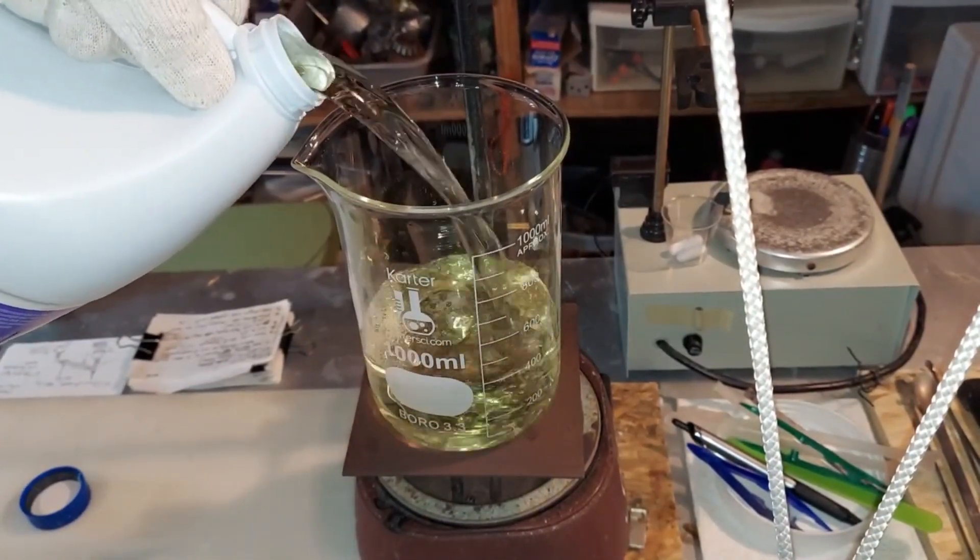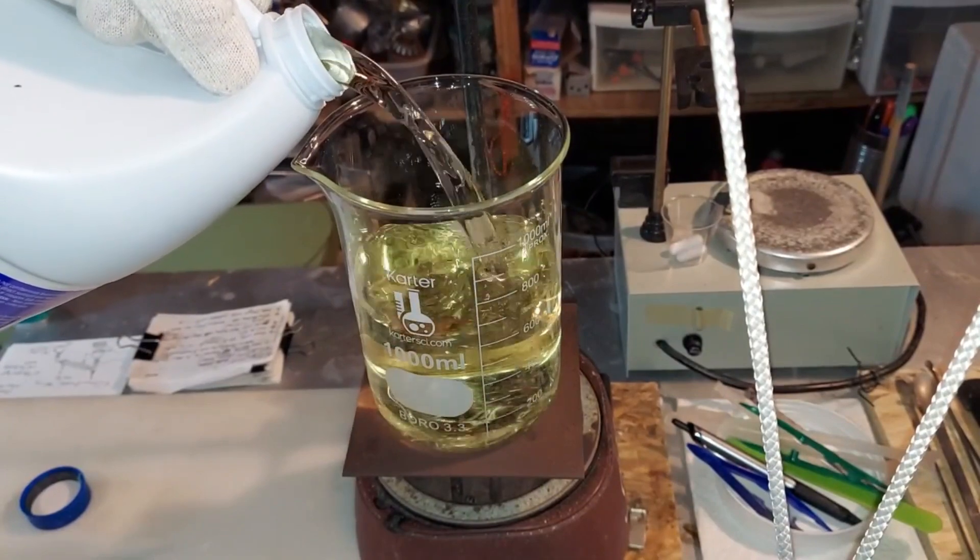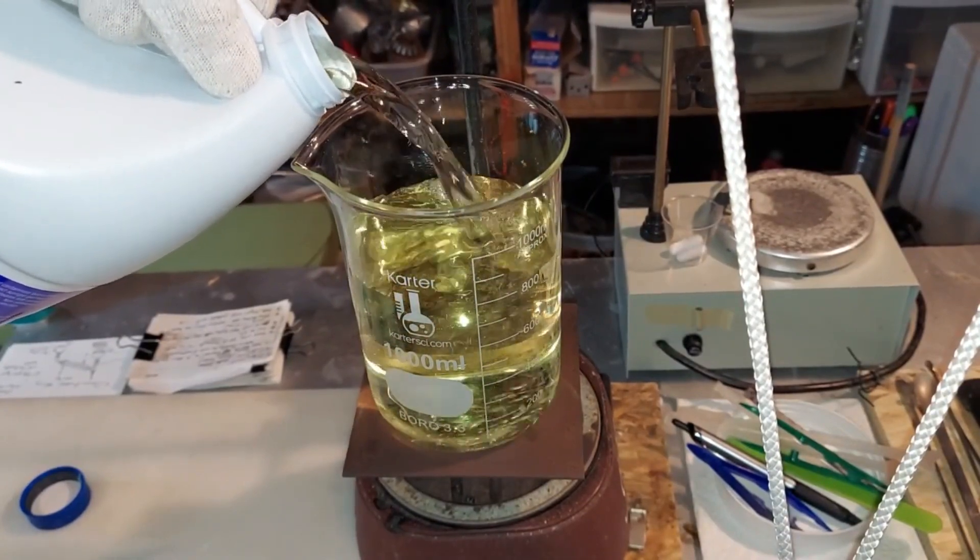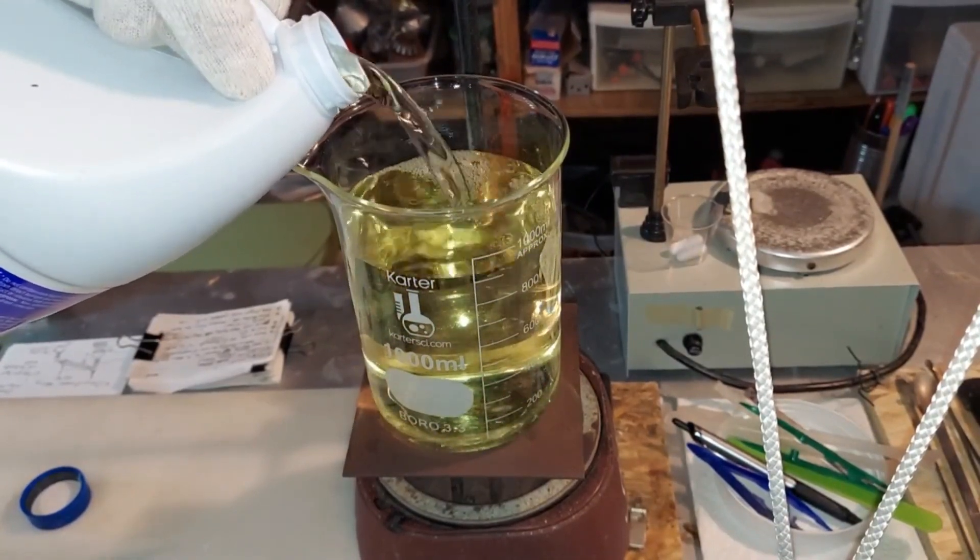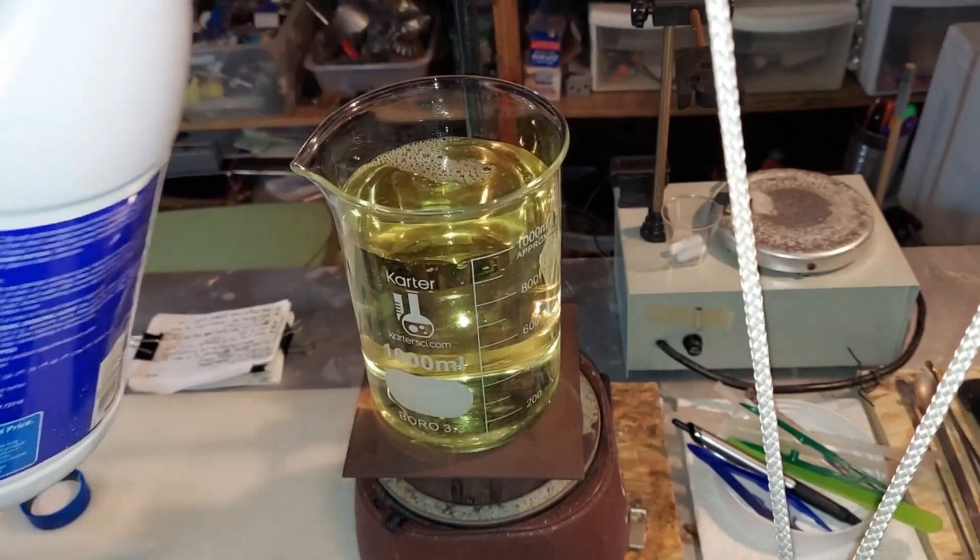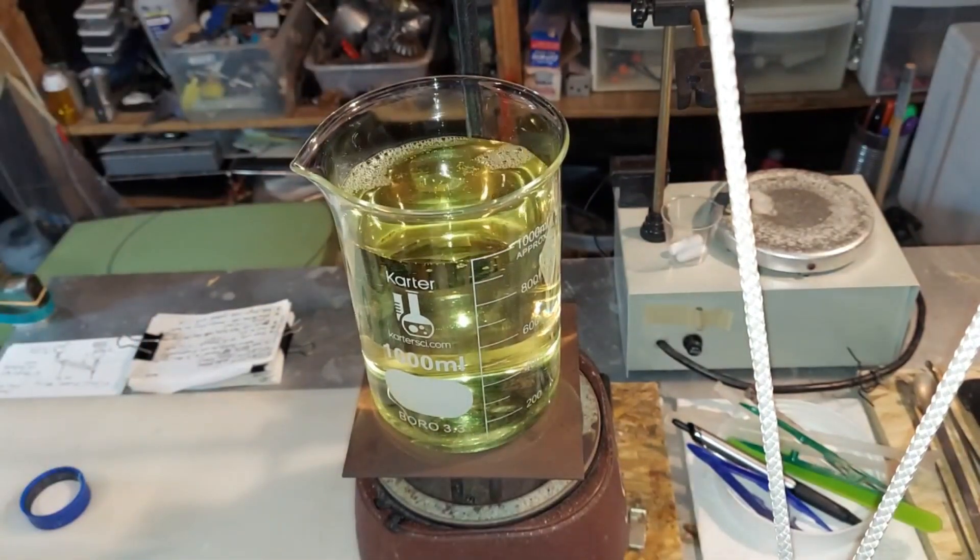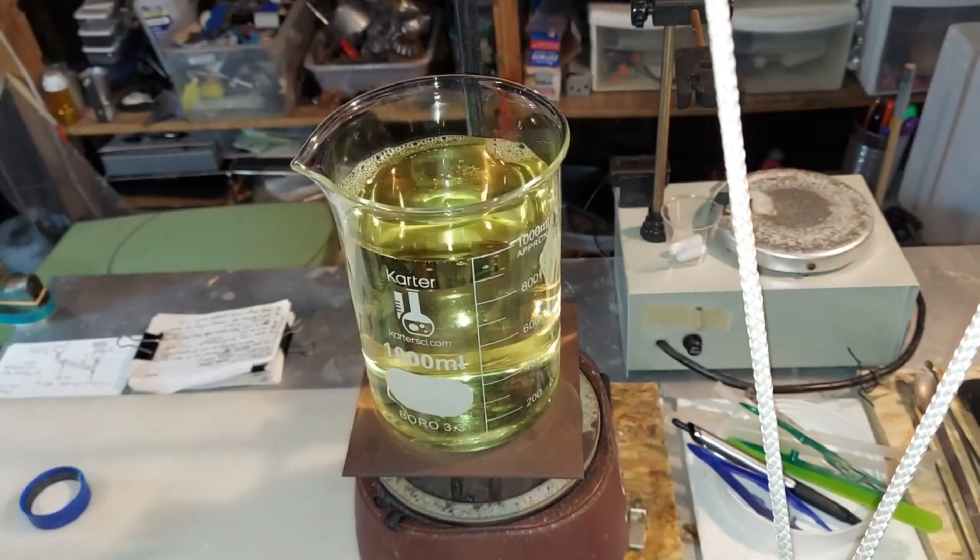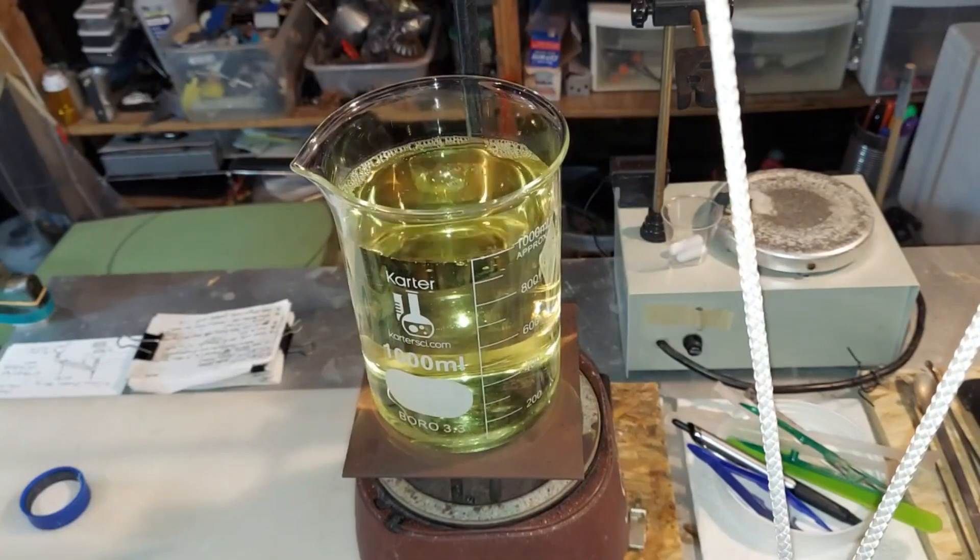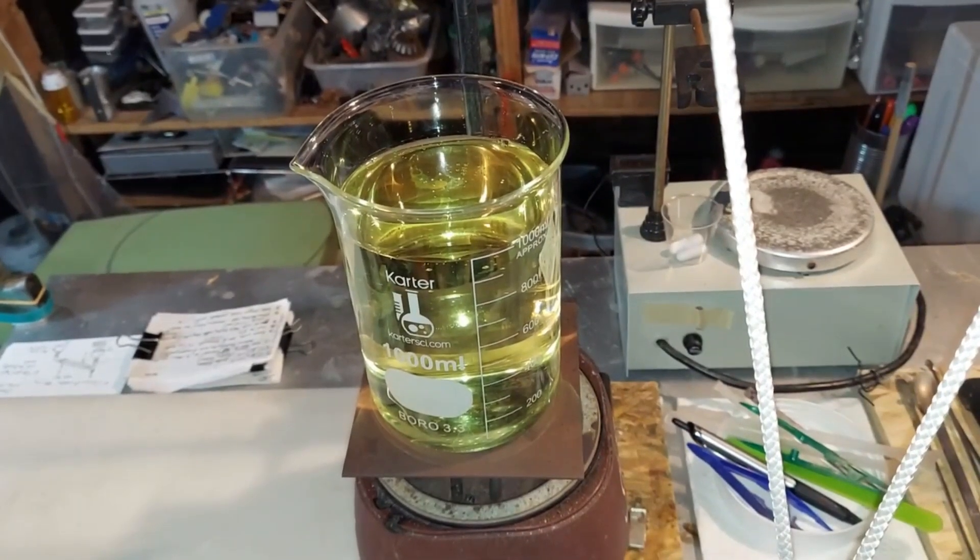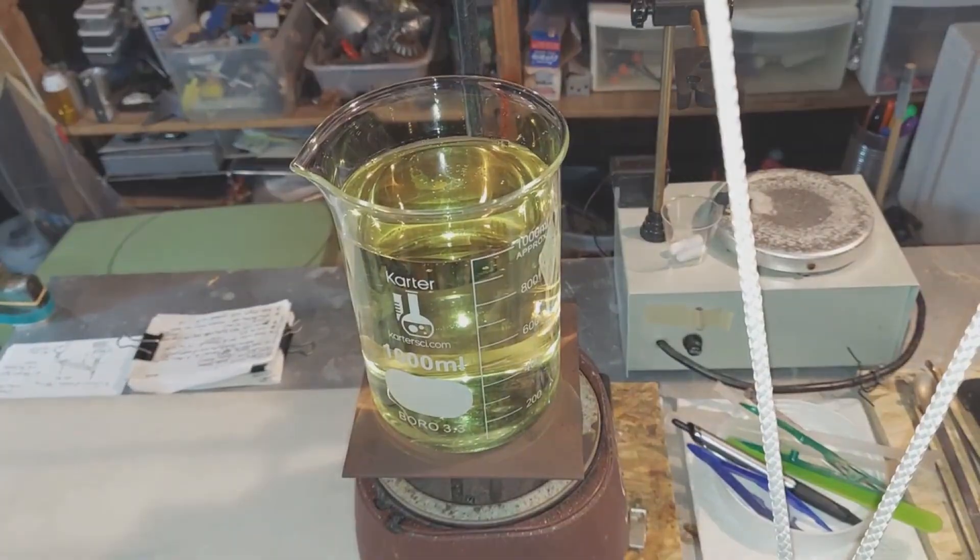Adding one liter of regular bleach to a one liter beaker. All right, and turn it on down here. Start heating it up and lower the fume hood. We need to boil this down until we see crystals. At that point we're going to stop and cool it down.